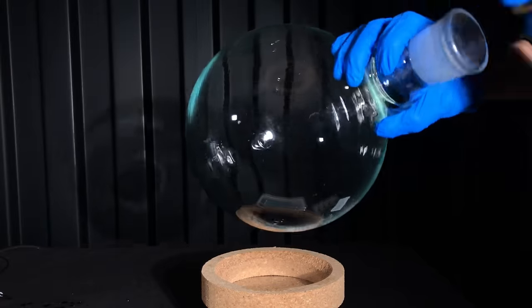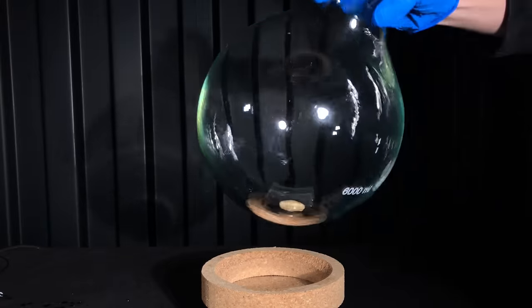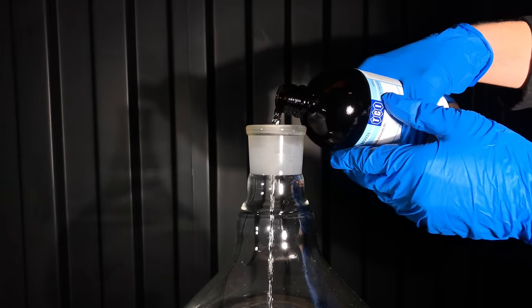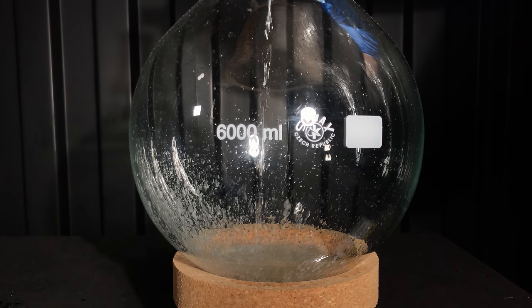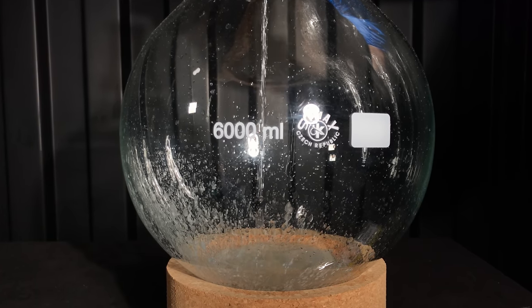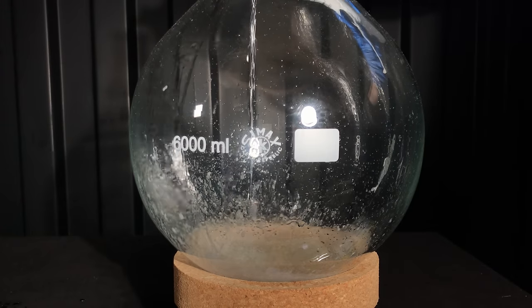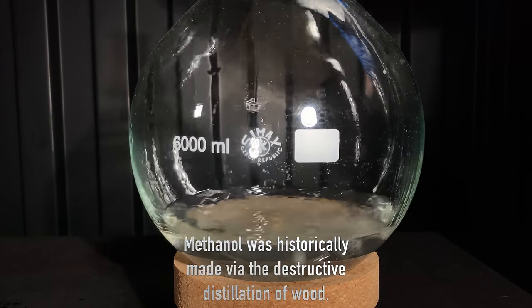For the reaction, you will need one average sized flask and a stir fish. 115 grams of malononitrile are then drained directly into the tiny flask. As it hits the glass, it instantly solidifies and turns into a white substance. We then continue by adding 400 grams of wood alcohol as a solvent.